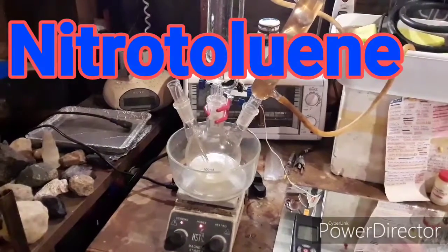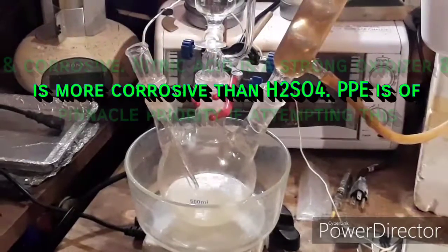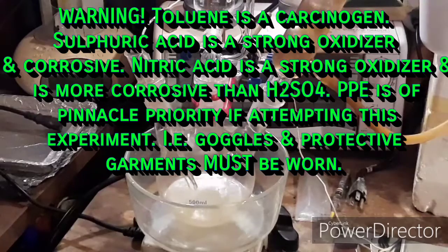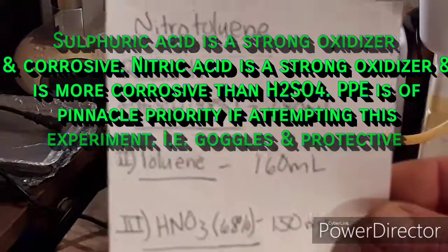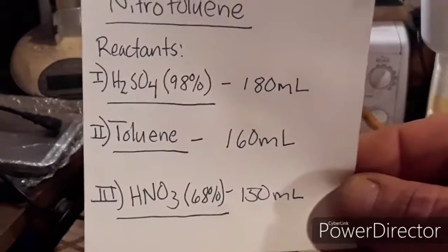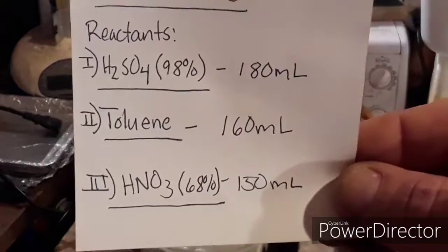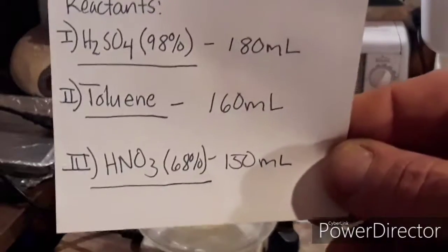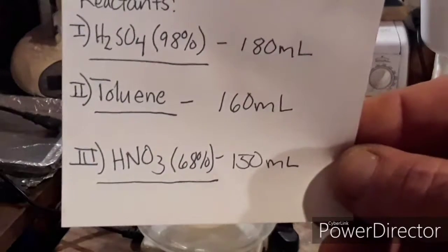This is the actual reaction process and setup for the nitrotoluene. The first thing to go over is the stoichiometric amounts of the reactants. There are only three reactants: sulfuric acid, toluene, and azeotropic nitric acid.